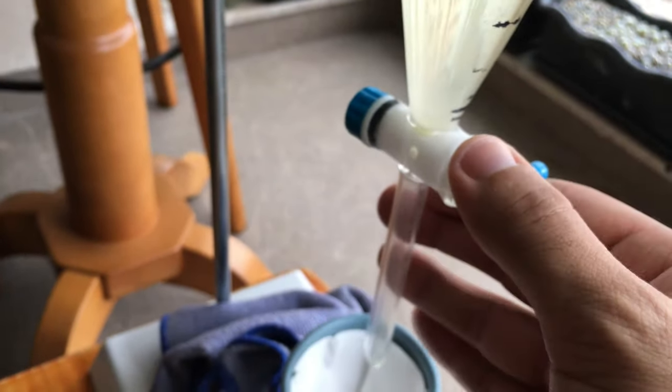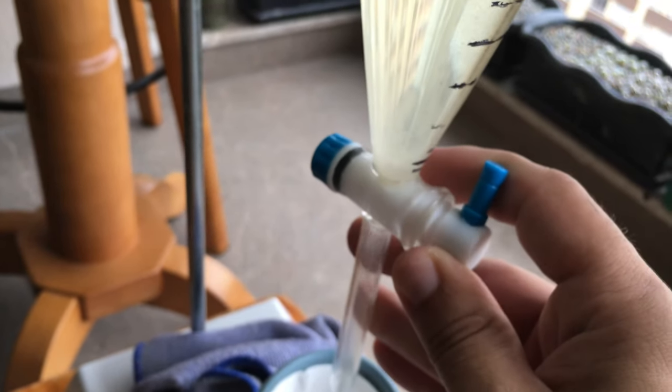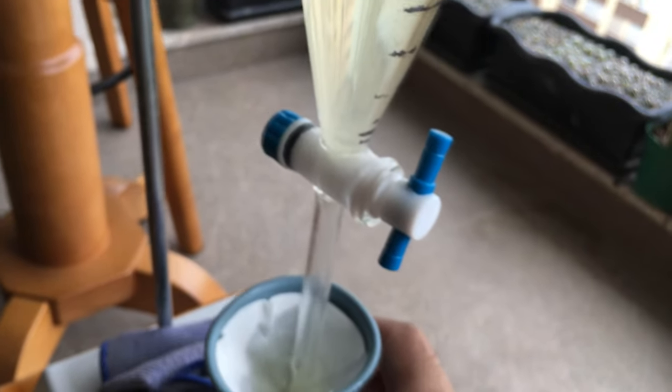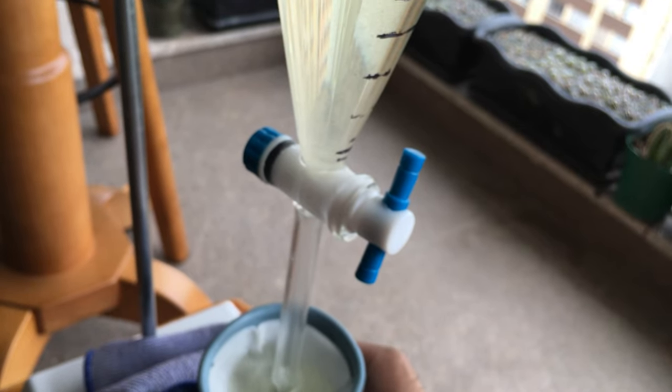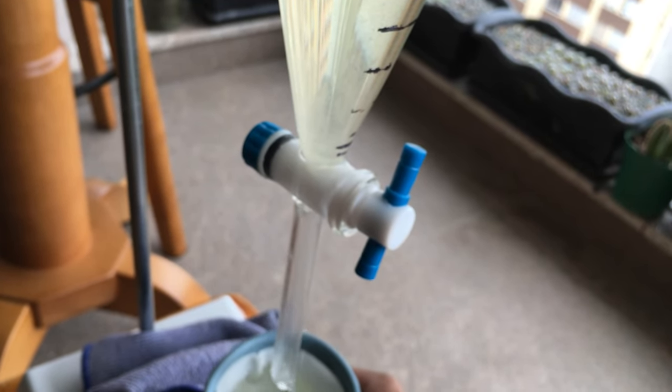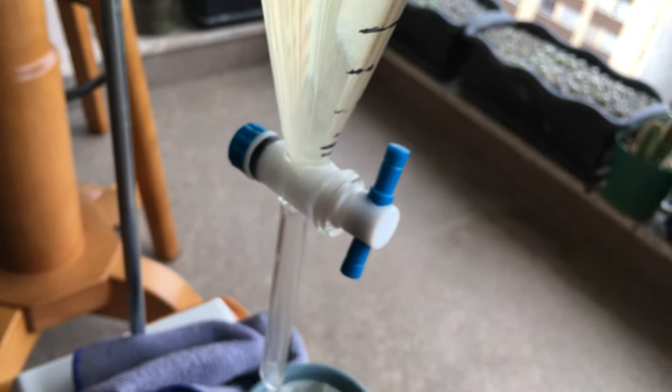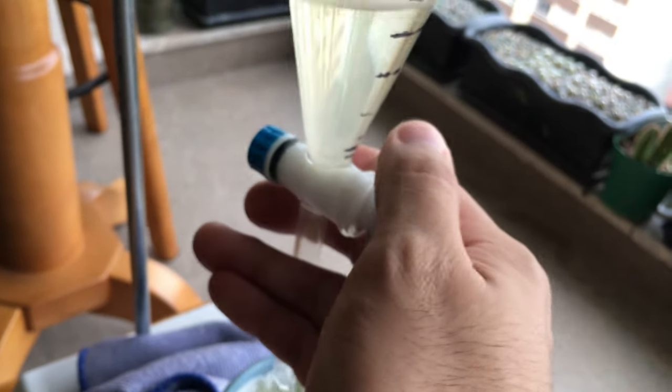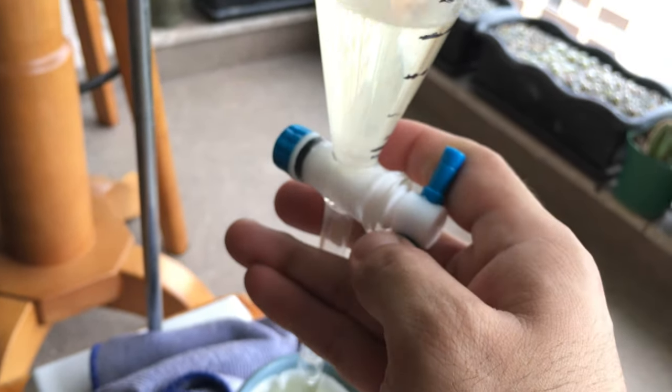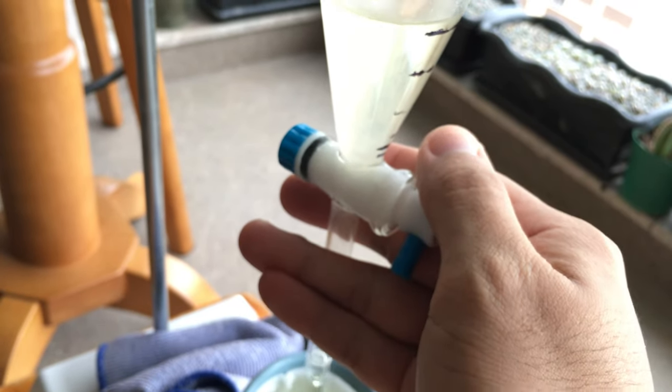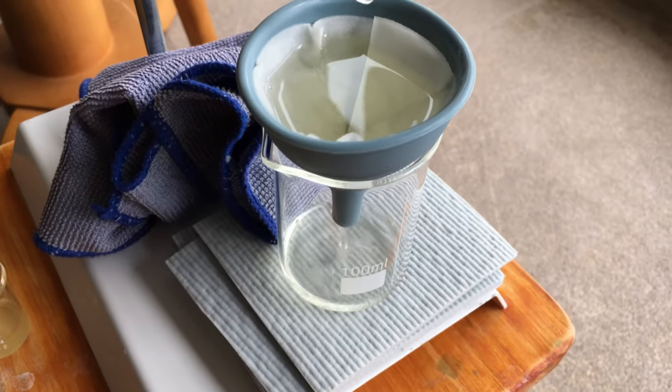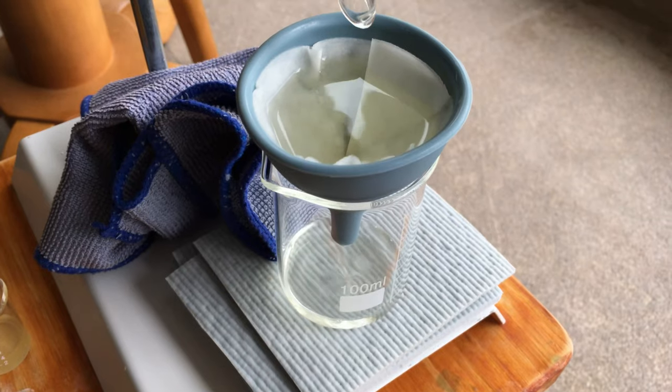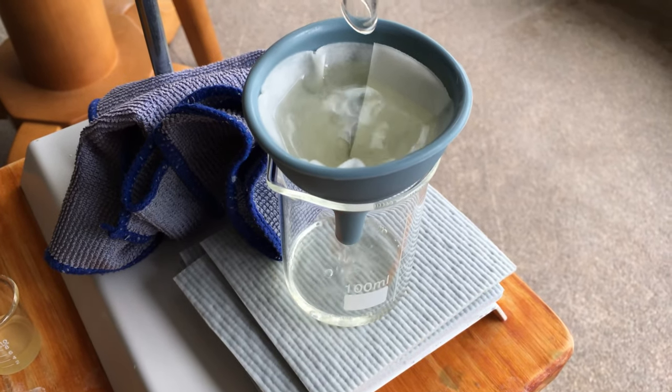This is likely calcium carbonate or calcium hydroxide precipitate, so I want to filter. It should be crystal clear and there is no water since I removed the small layer, and I can salt immediately after.